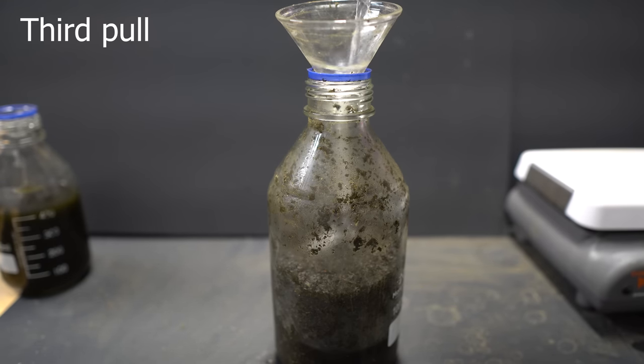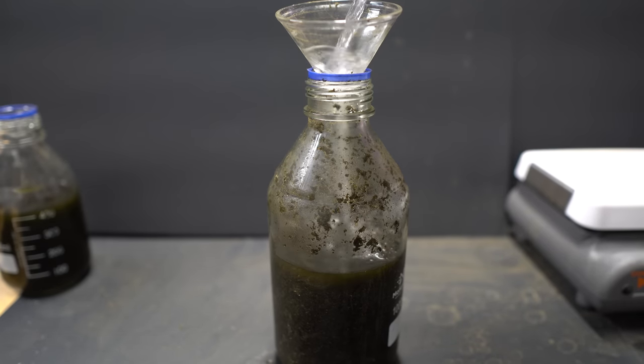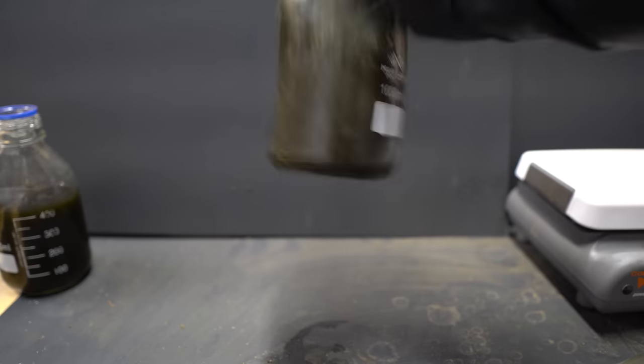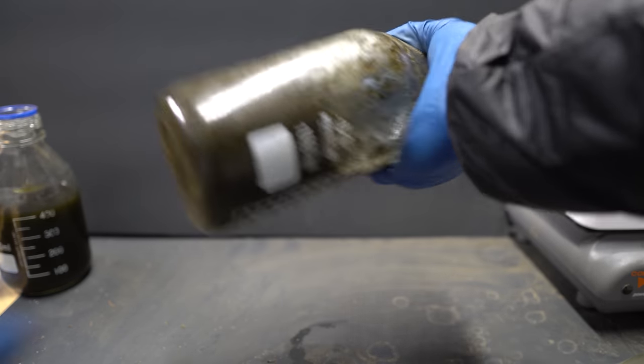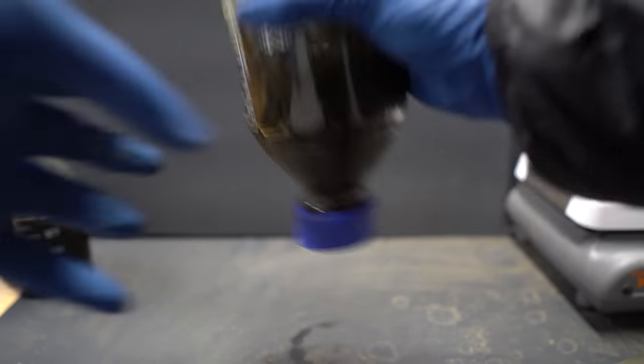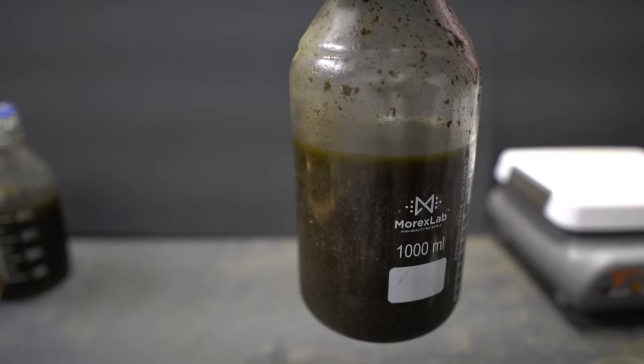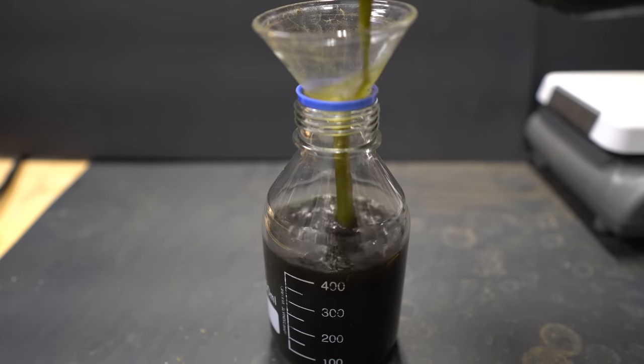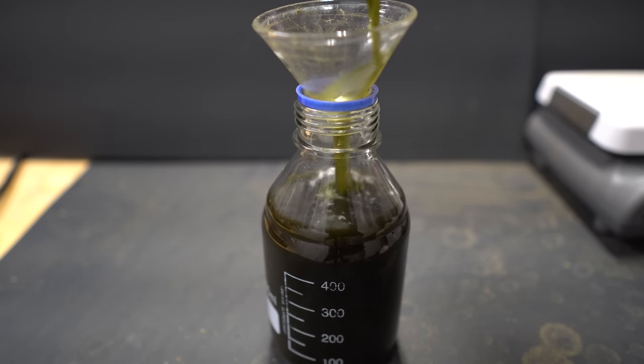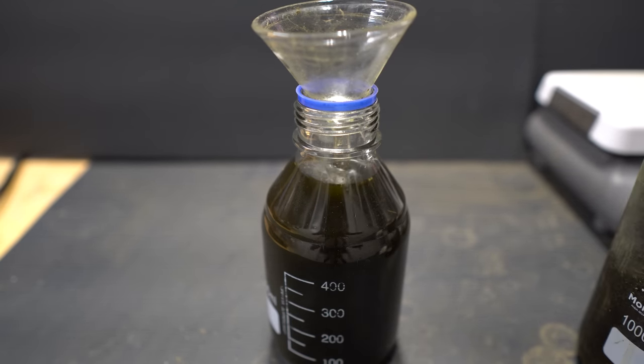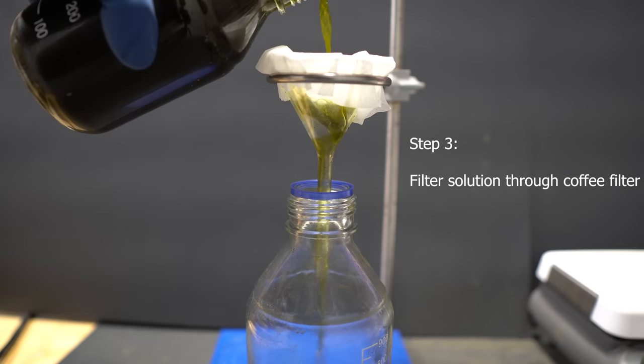We then decant all of the acetone that we can using the cap as a blockage so not a lot of plant material gets in. Overall for the three pulls I used about a liter of acetone, however I would go a little bit above that. As I was doing the three pulls I really should have put on another pair of gloves as my hands got extremely cold.